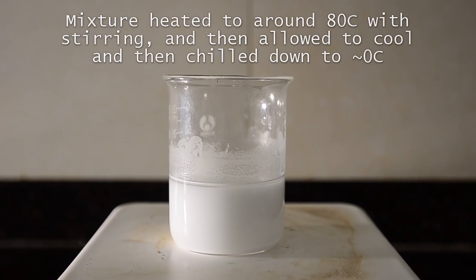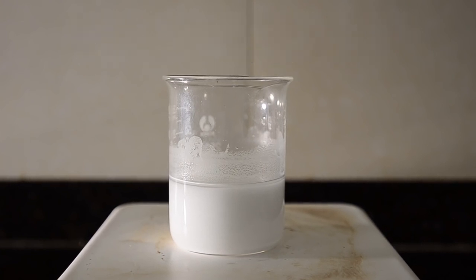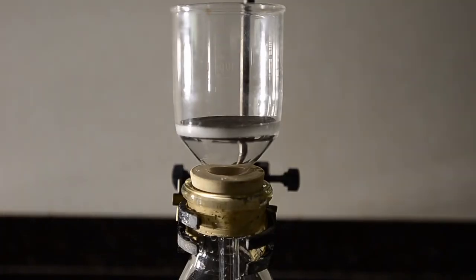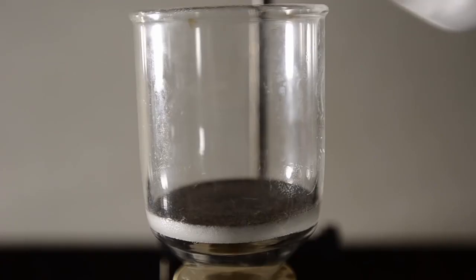On chilling for a few hours, the salt fell to the bottom of the beaker leaving the clear solution. So we set up for vacuum filtration and removed the white salt from the liquid.